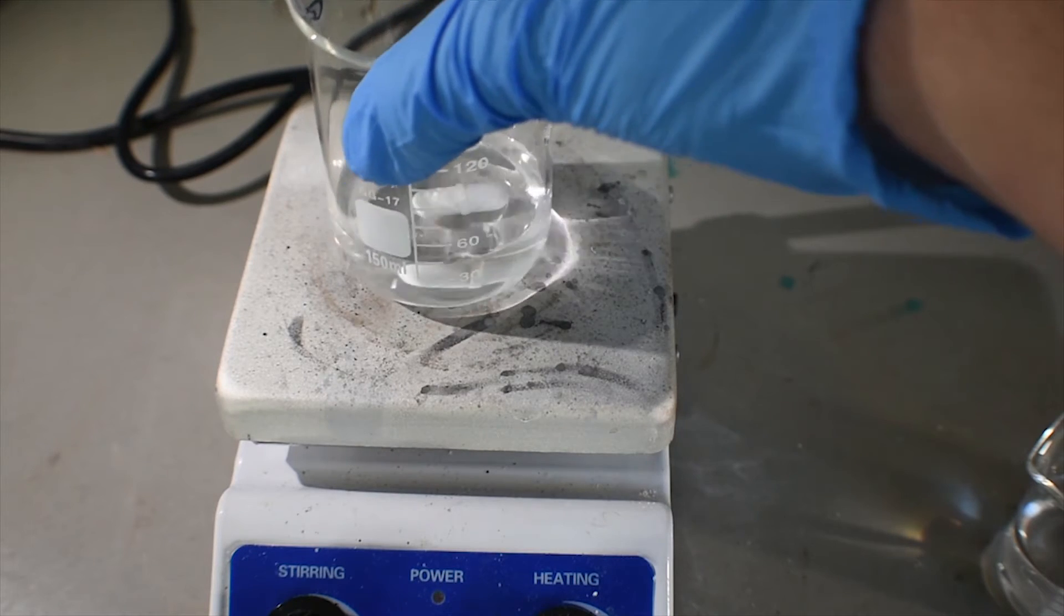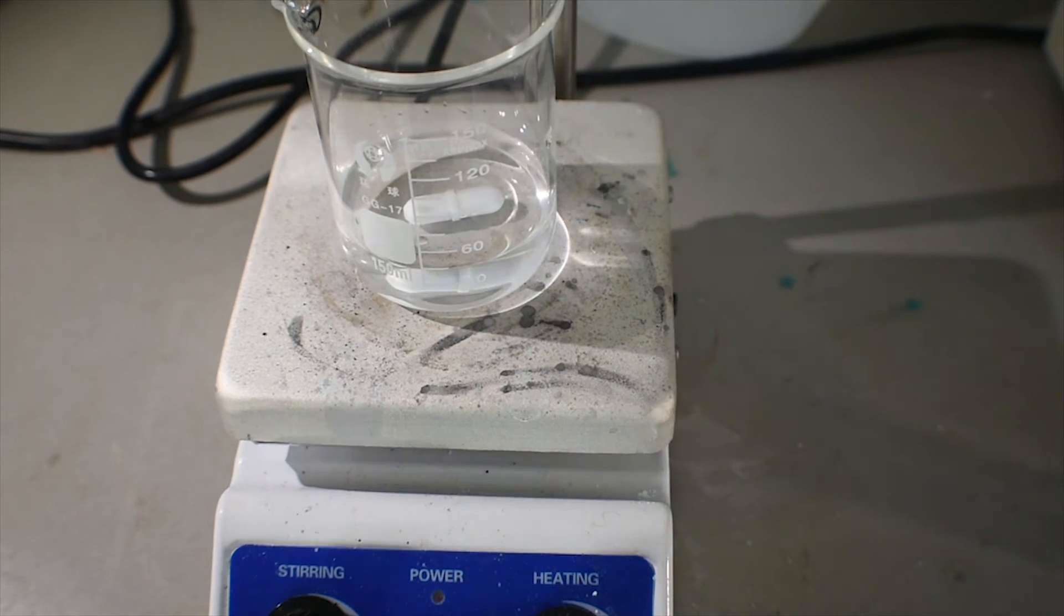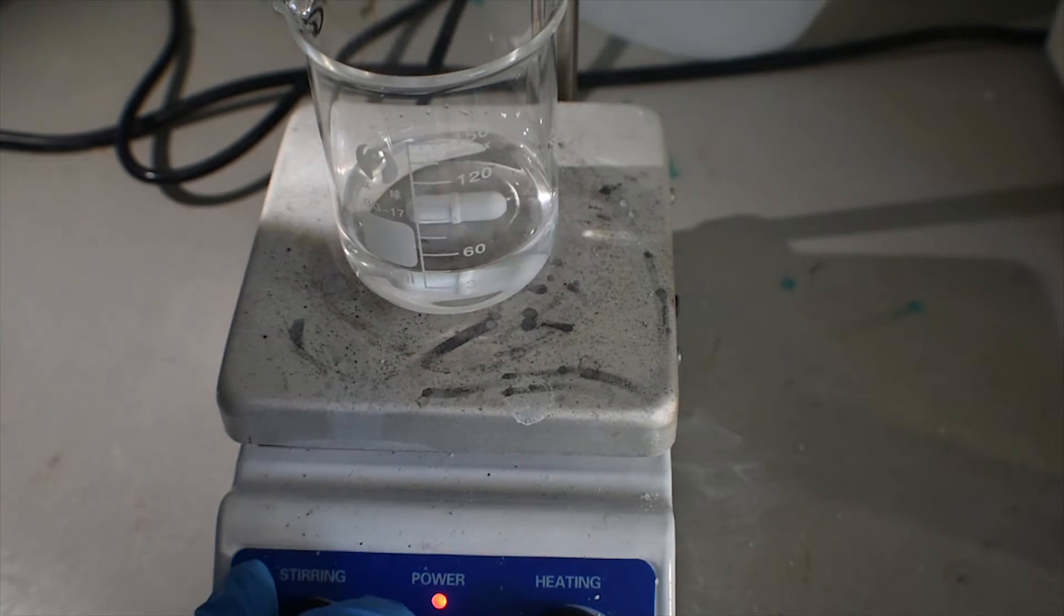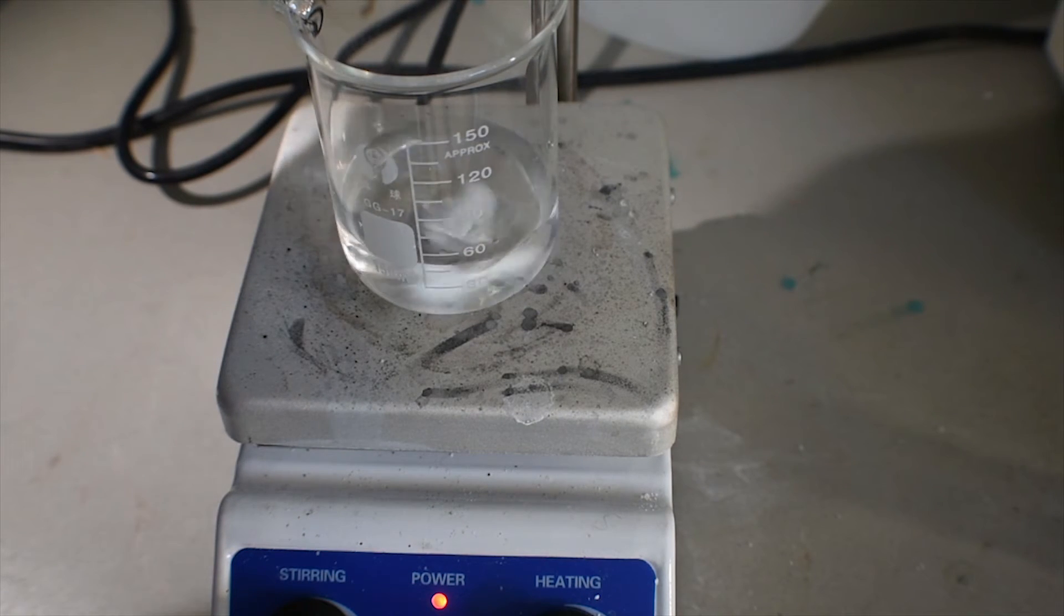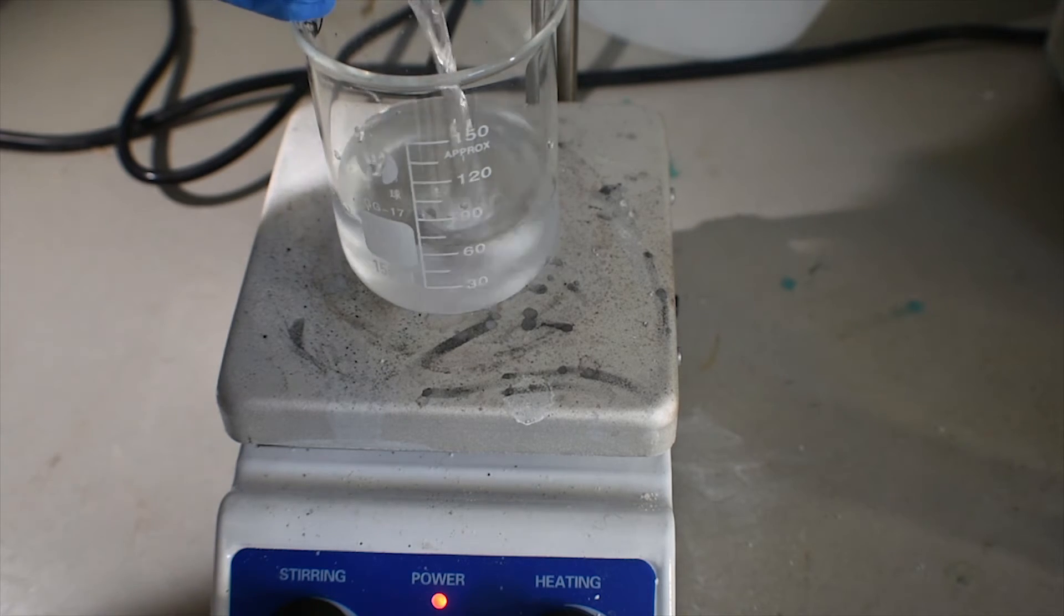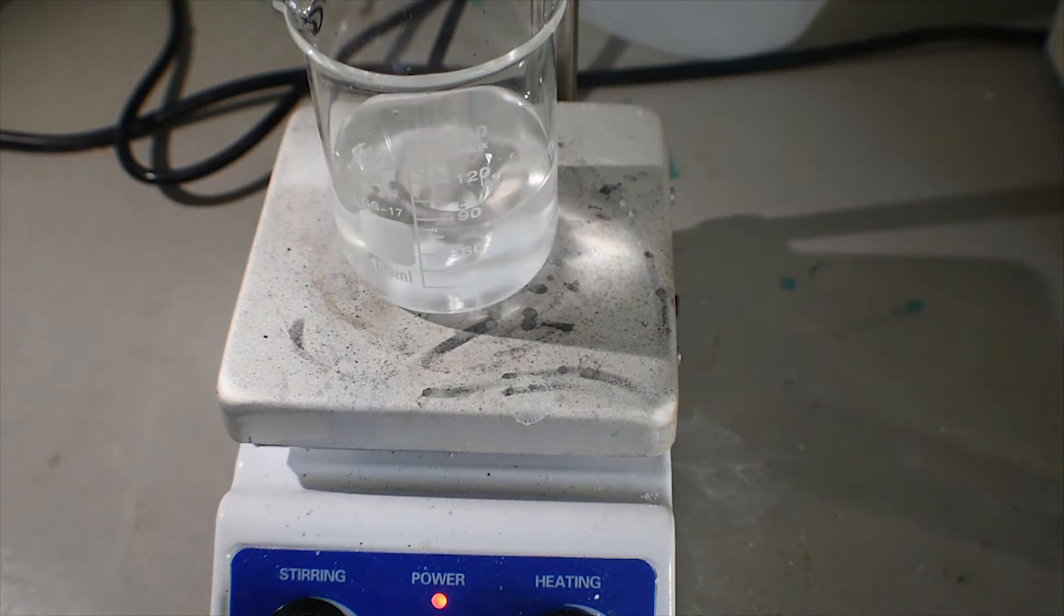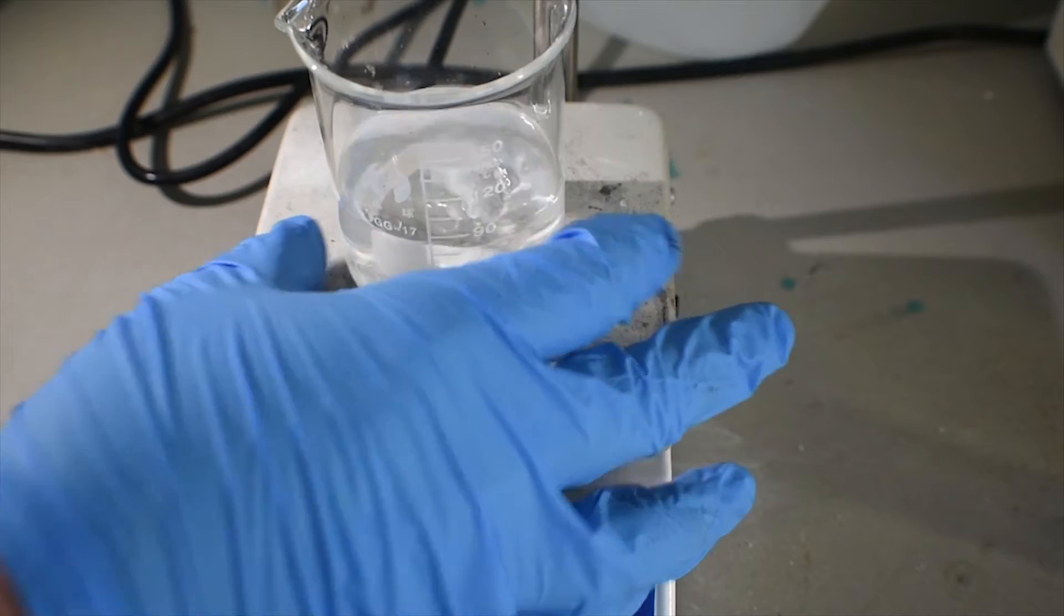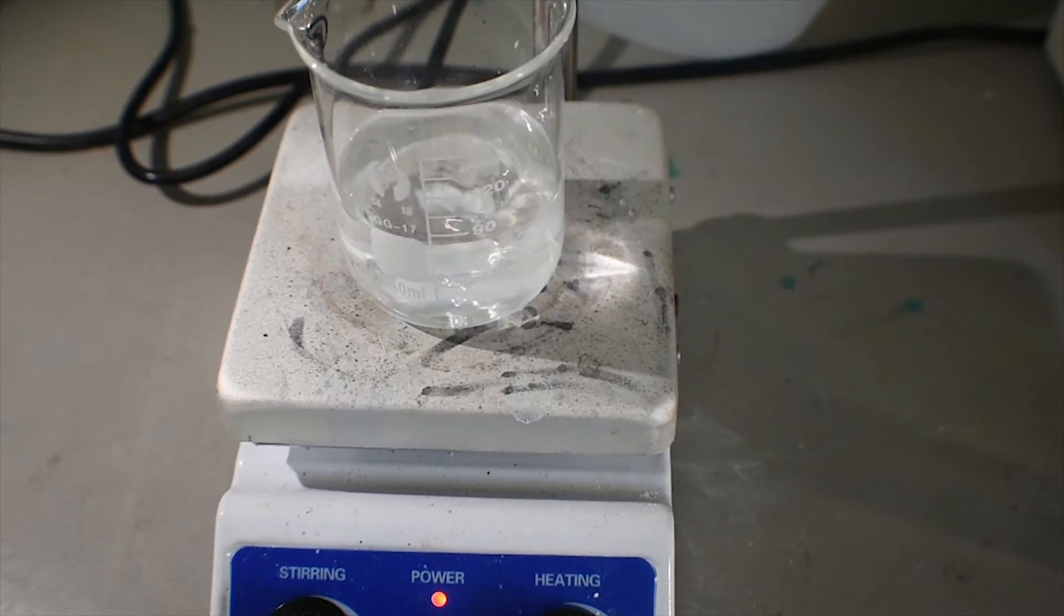Okay, so I'm going to get my distilled water, 36 grams of it, and by mixing it with another 36 grams of glacial acetic acid, we're going to make a roughly 50% glacial acetic acid solution by weight. So you won't get much of an exotherm there. It's no real big deal because you're going to get a hell of a lot of exotherm in the next step, that's for sure.